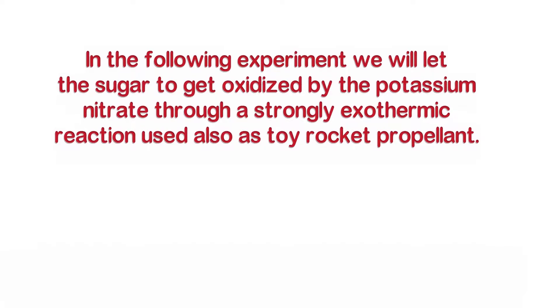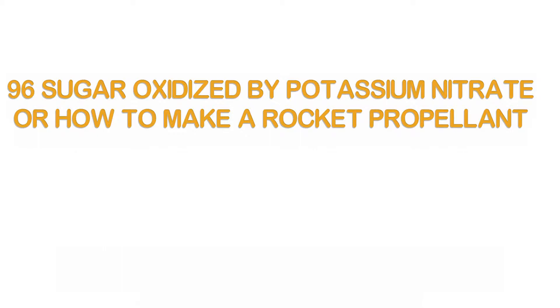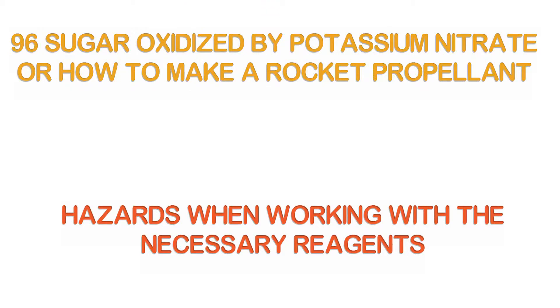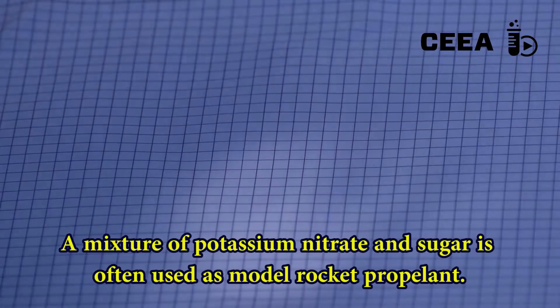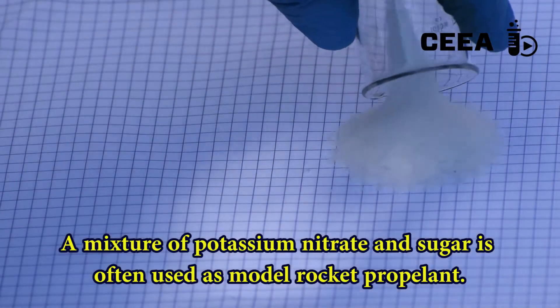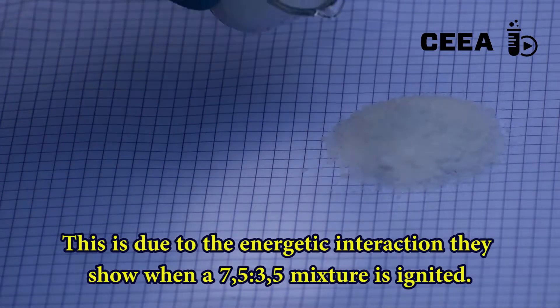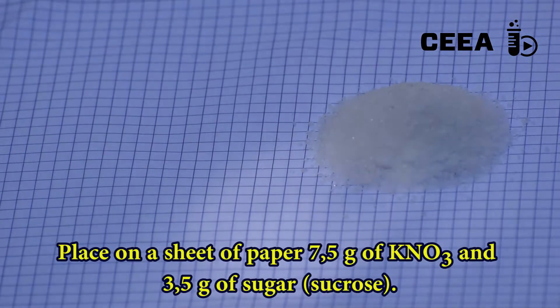Experiment number 96: Reaction of sucrose with potassium nitrate, or how to make rocket propellants. When using potassium nitrate we have to keep in mind its great oxidizing capacity. In this experiment, potassium nitrate oxidizes sugar in a reaction used to propel model rockets. Weigh 7.5 grams of potassium nitrate and 3.5 grams of sugar.